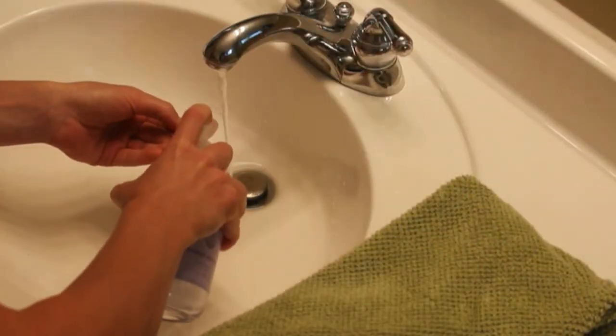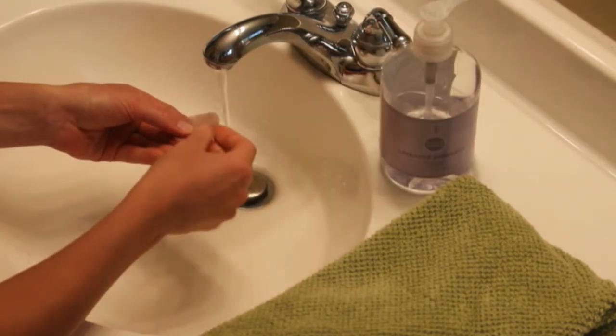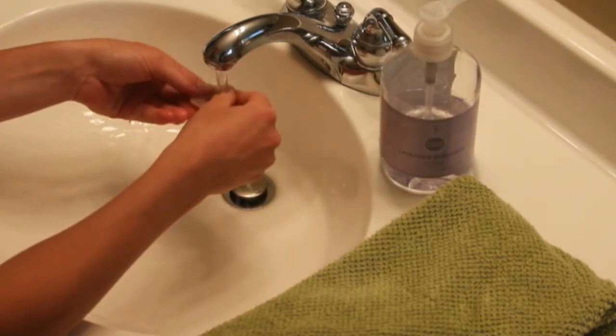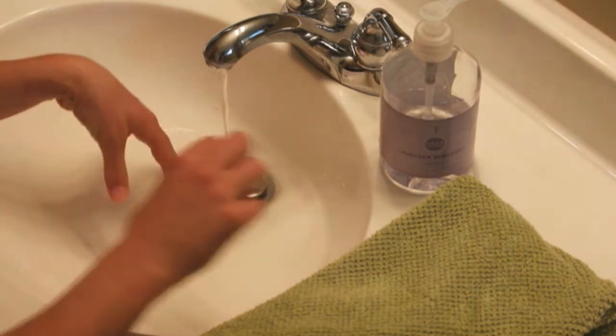Clean the prosthesis with water and hand soap. Lightly dry the prosthesis with a towel or allow it to air dry. Adhesive may now be reapplied.